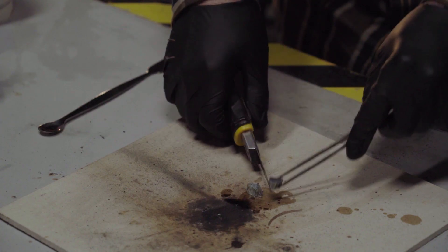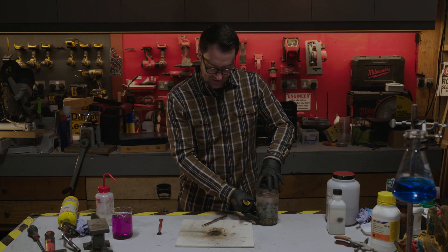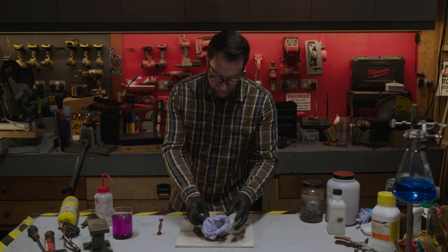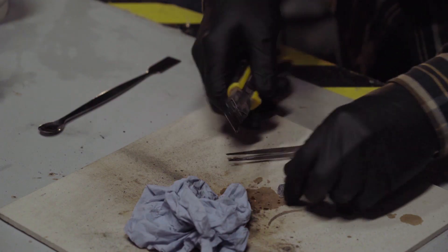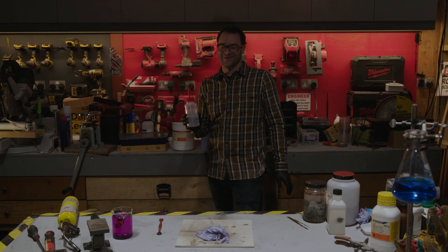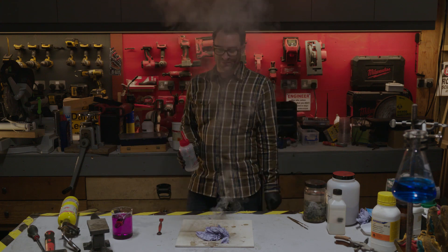Let's take a little bit like that. In order for this to spontaneously combust, it needs to react with water. So to make a fire, I'll put some rag down here and chop some really fine bits of potassium. That went straight away — spontaneous combustion.